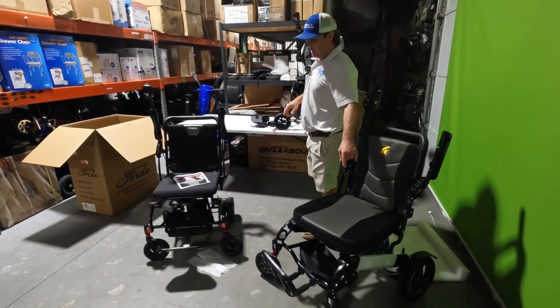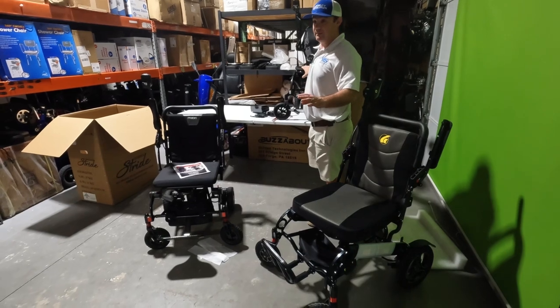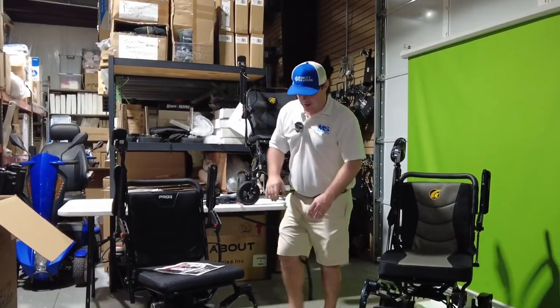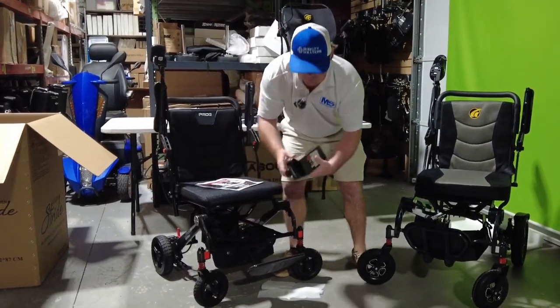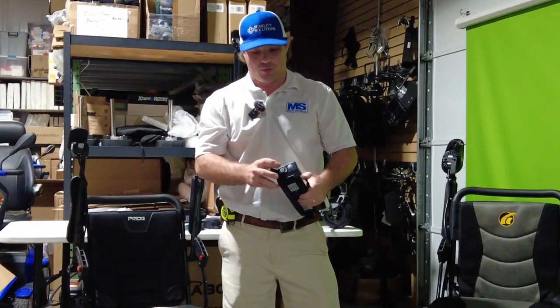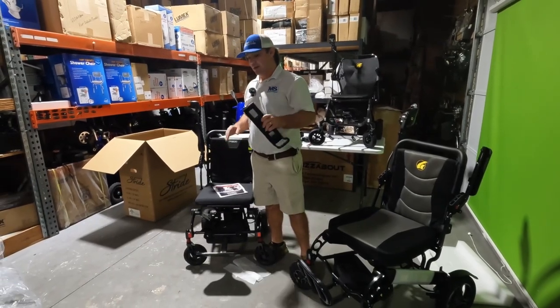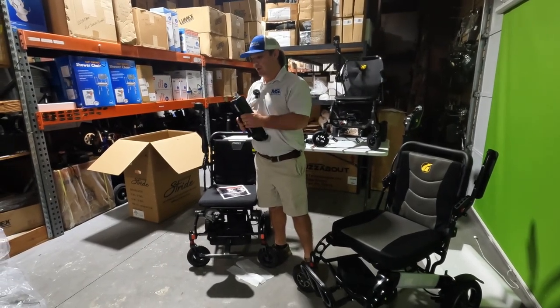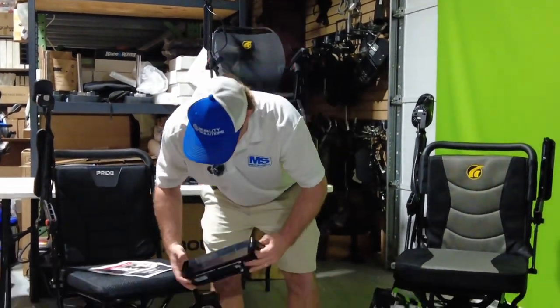Out of the three, this is the best cushion, this is second, this is third — but again, that's an easy fix changing the cushions. They all have batteries that come up to the front and can all be charged through here. You can leave the chair in the car, take the battery inside and charge it up, then carry it back out when you're ready to go.